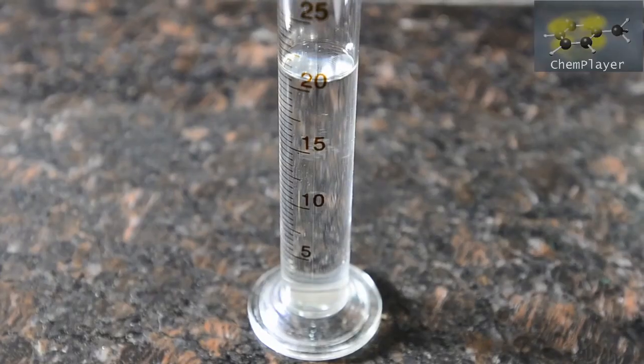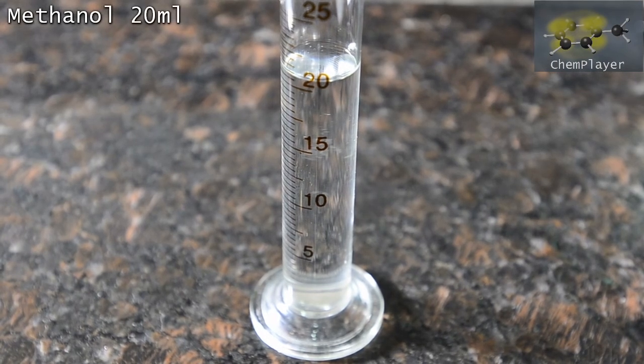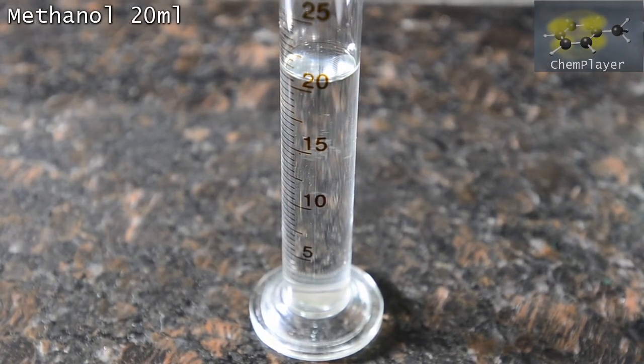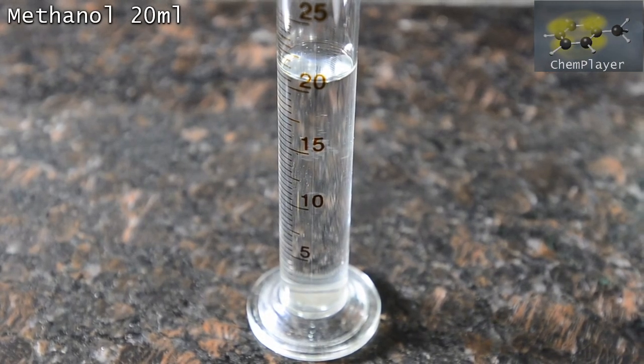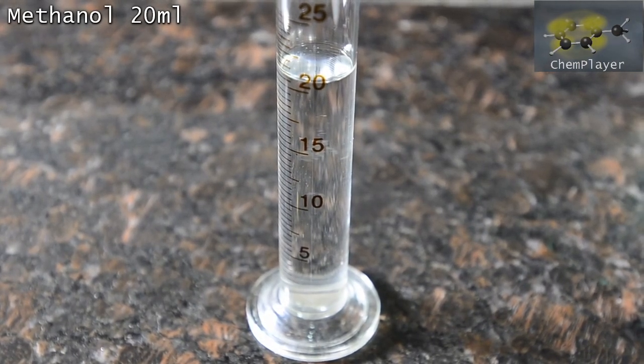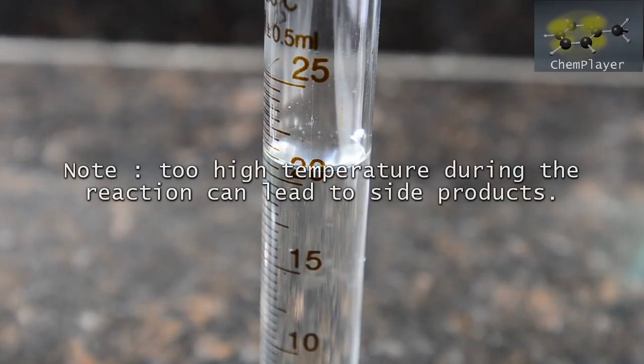Okay, here's our solvent for the reaction. We've measured out 20 ml of methanol. We read a few different procedures and it looks like you can also use ethanol for this, and possibly also isopropanol as well. We chose methanol though because it has a lower boiling point and so there's less chance of us overheating the reaction mixture, which can lead to impurities.